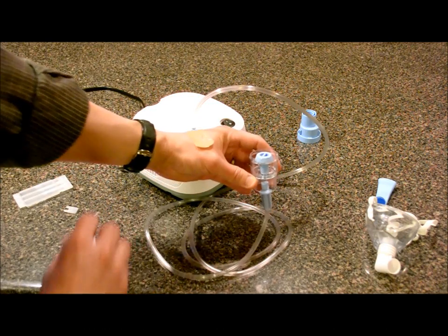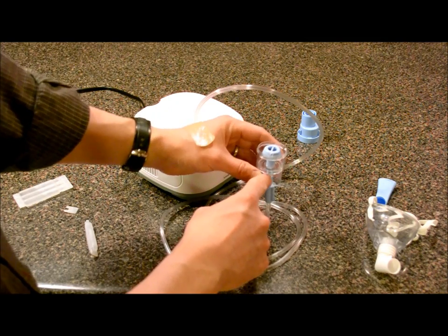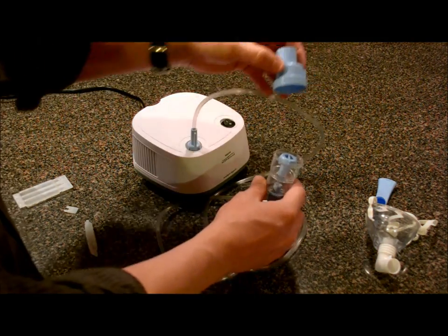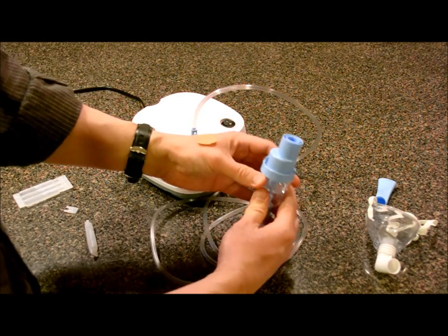Hopefully you can see that. The medicine is in there — it's about a couple of milliliters. Then you put the cap on top of that reservoir and screw it in tight. It won't click but it won't turn anymore.